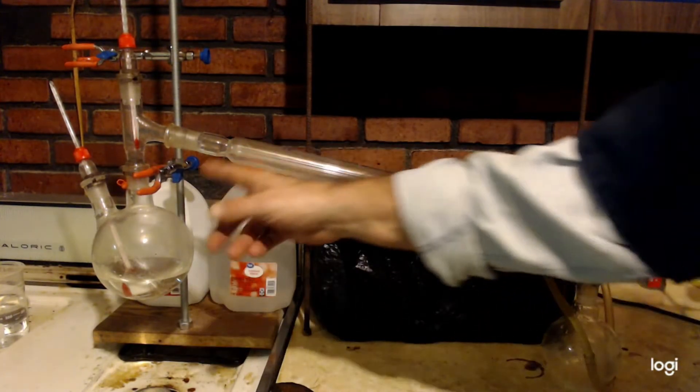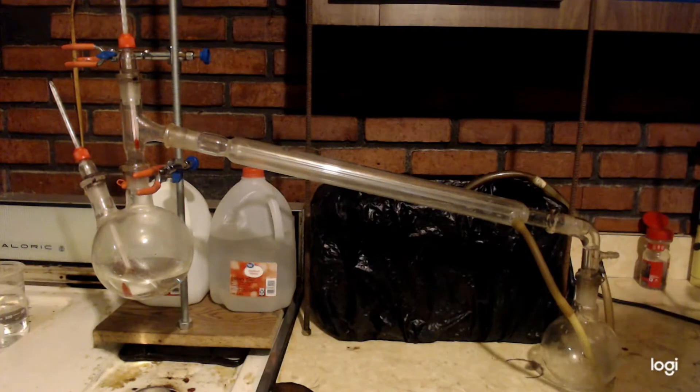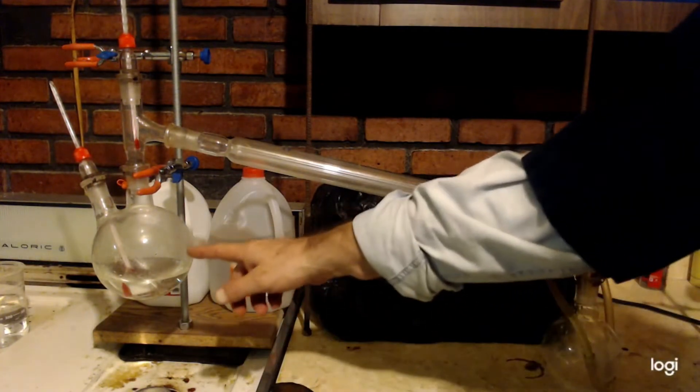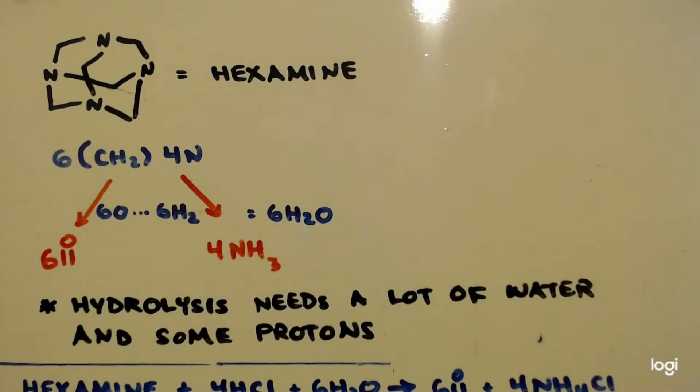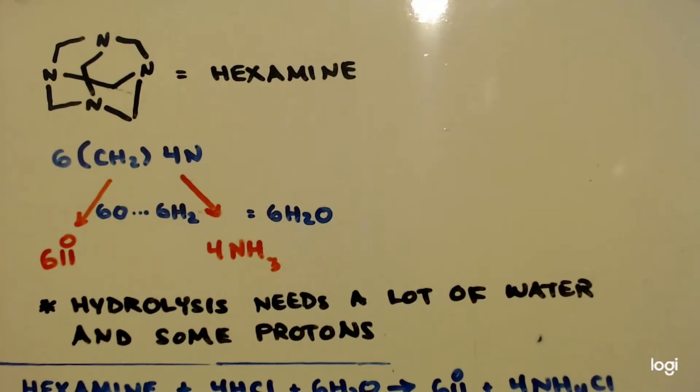And now I need to add 200 milliliters of hydrochloric acid that I have in the freezer right now cooling down. So what have we done so far? We've got some hexamine and we've purified it by putting it in water, dissolving it and filtering out the impurities.